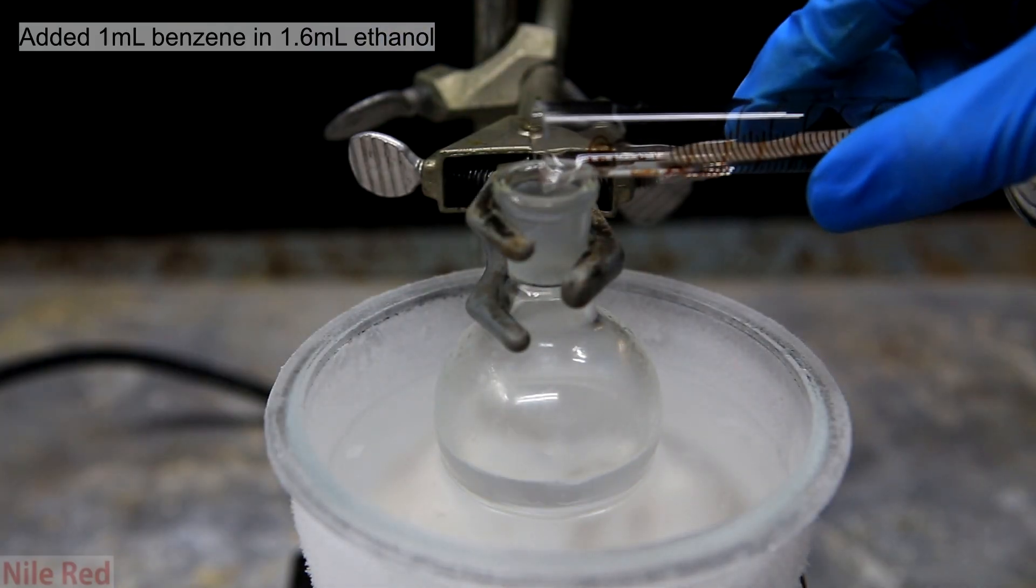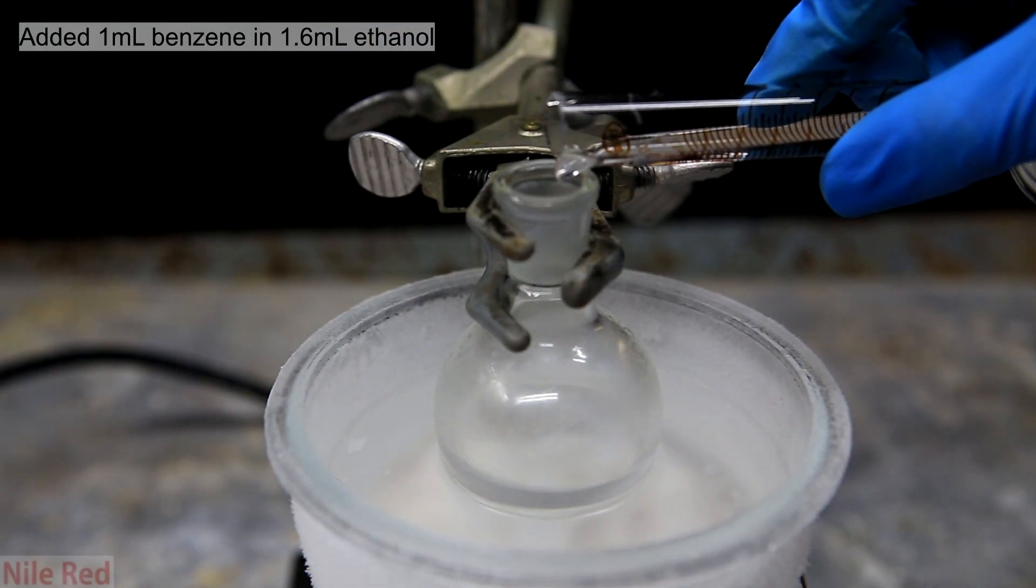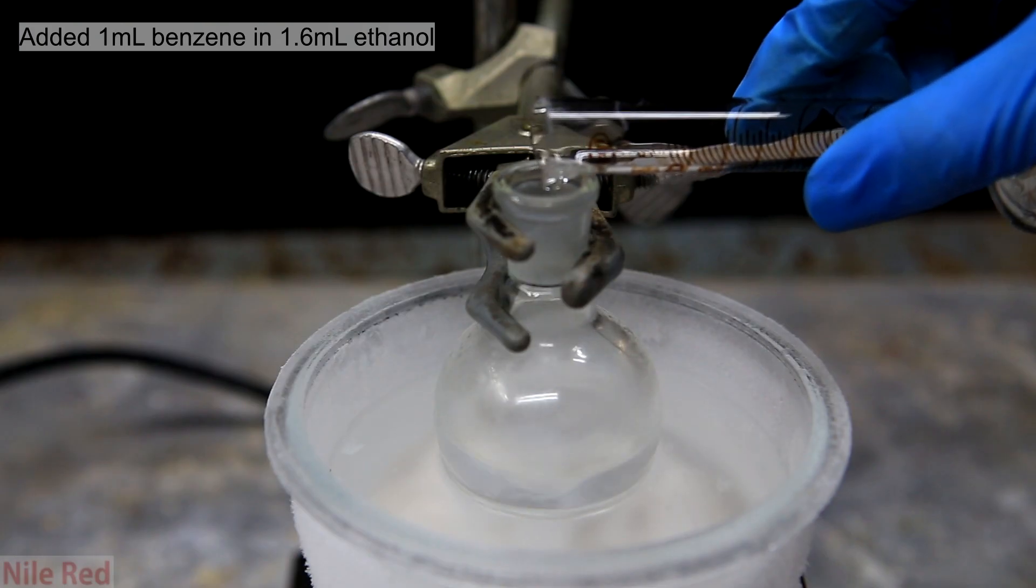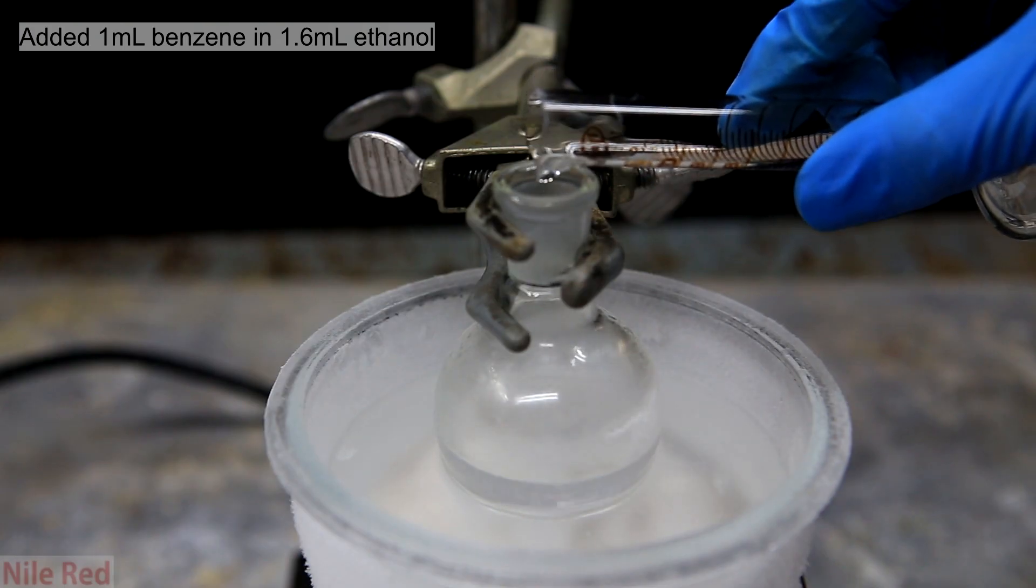The cap's then removed and I slowly pour in one milliliter of benzene that's dissolved in 1.6 milliliters of anhydrous ethanol.